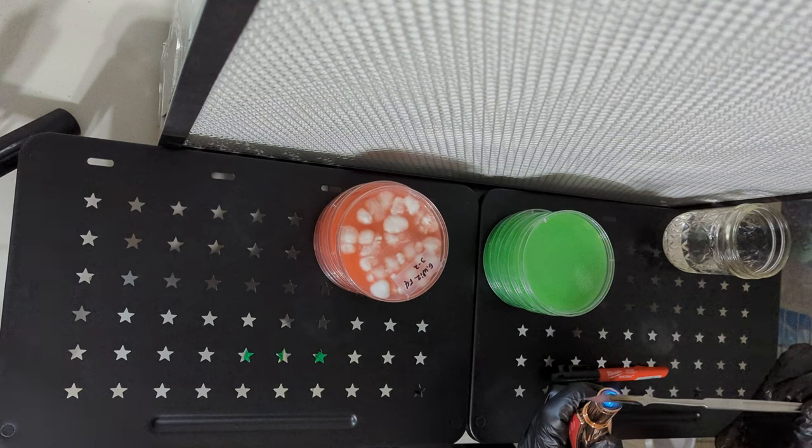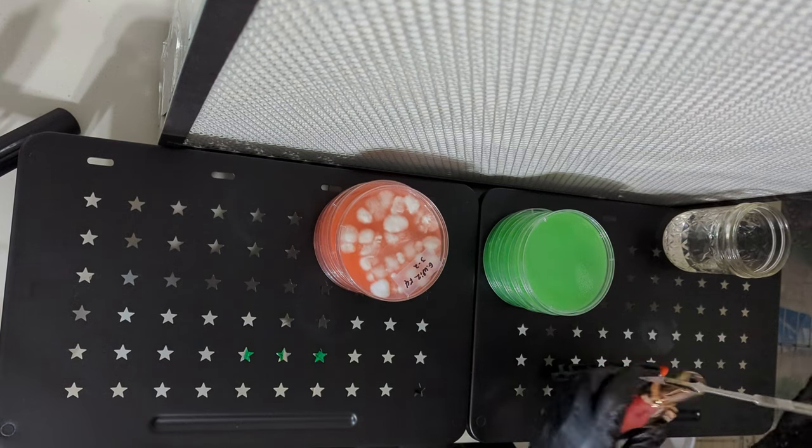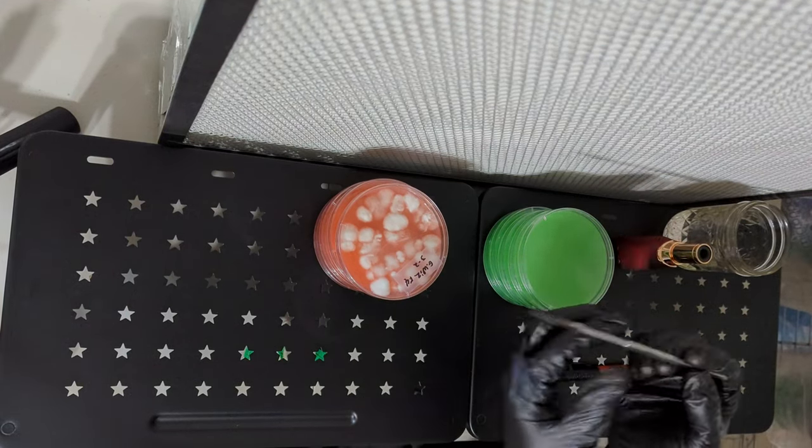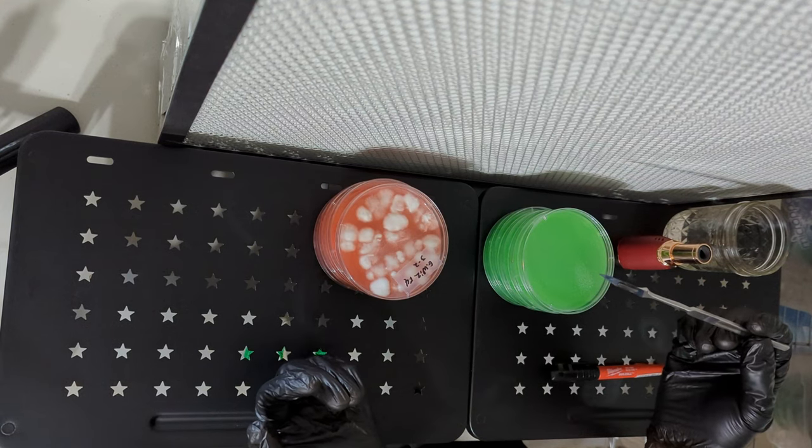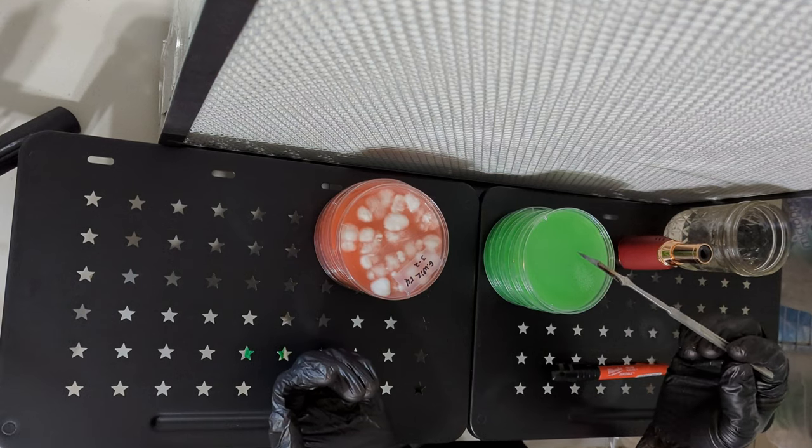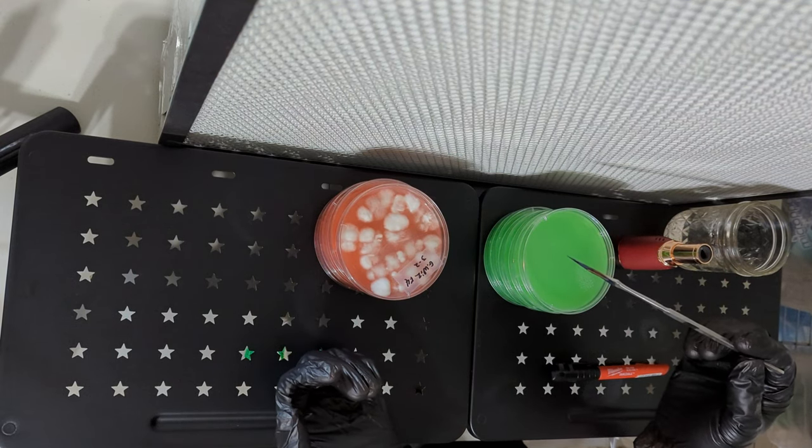If you're unfamiliar with agar, then this video is for you. Agar once prepared is a gelatinous substance like gelatin or jello, but it's made from a different source than gelatin. Agar comes from red algae, so it's vegan as well, as it comes from the cell walls of the algae.